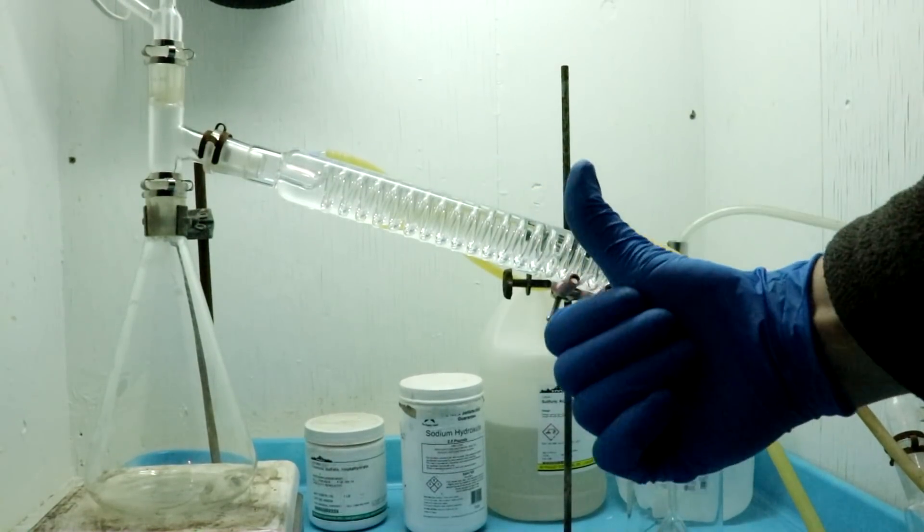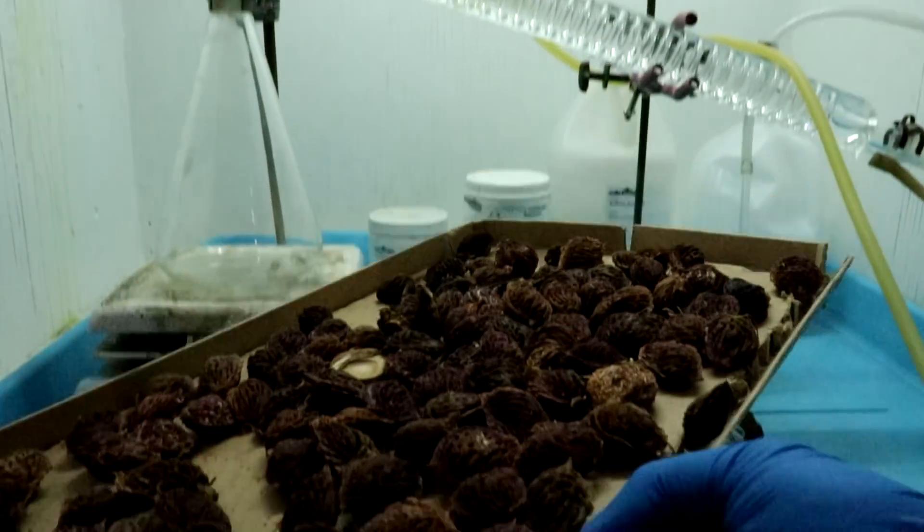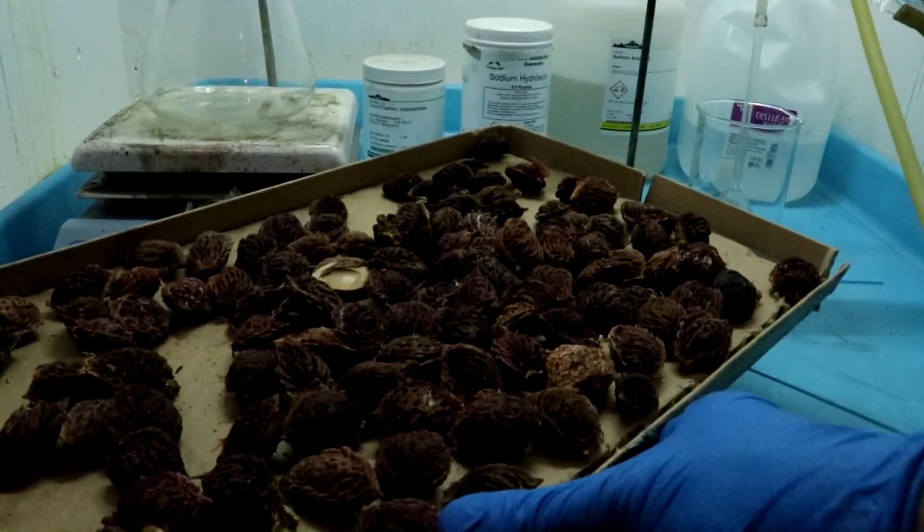Alright everyone, welcome back to Cody's Lab. So today I'm going to attempt to extract prussic acid from peach pits.